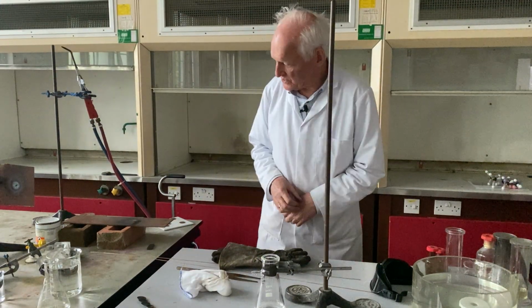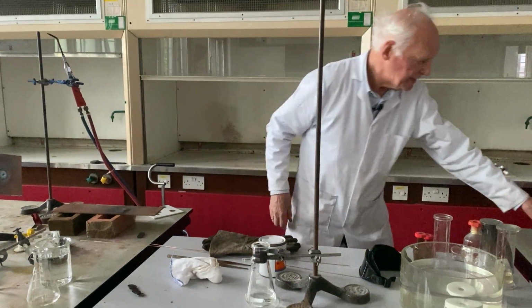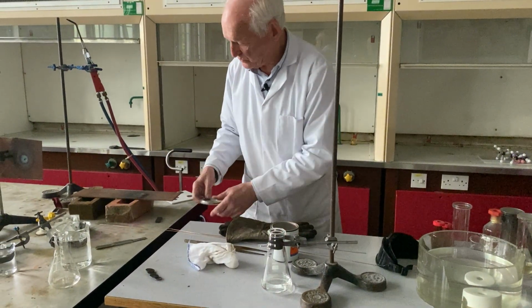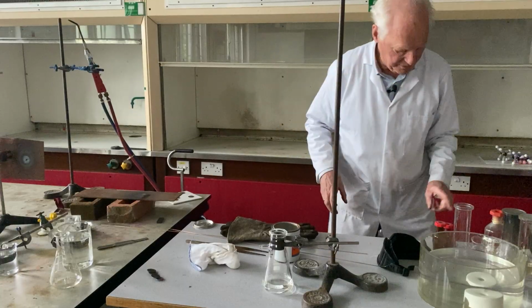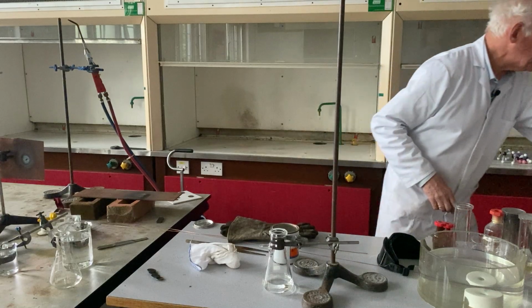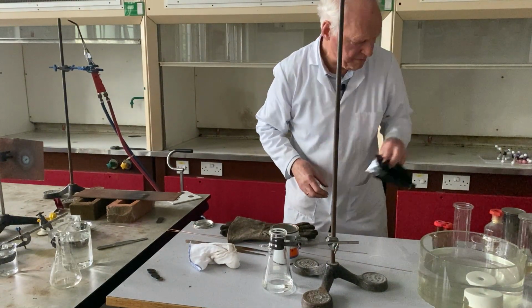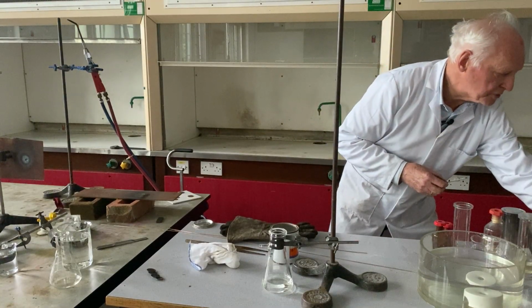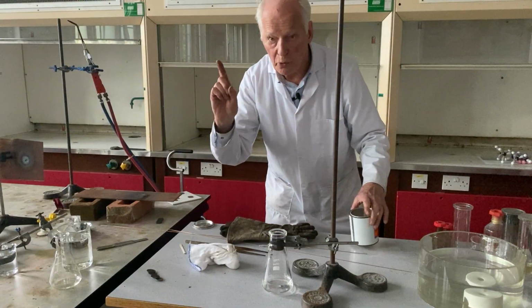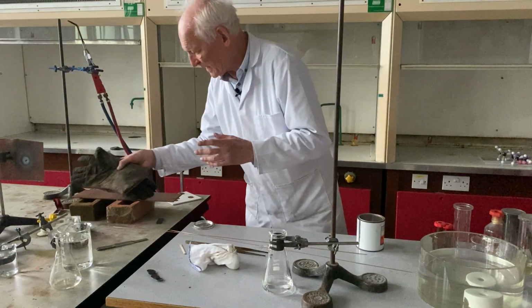So, in order to do this, we have to have our tin here. There is some water already placed in there, and I have to move fairly quickly, by the way, so if you don't mind, I'm going to get myself a lighted splint. I have some splints around, you must excuse me. I think the only one I've got is this. Too bad, we shall make use of it. And I'm going to just have my flame there, just checking everything. Always double check. There's nothing that can happen which is unexpected or dangerous.